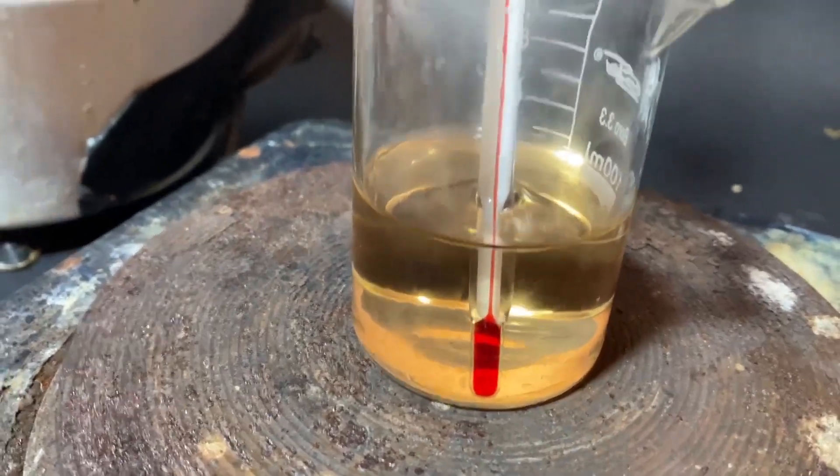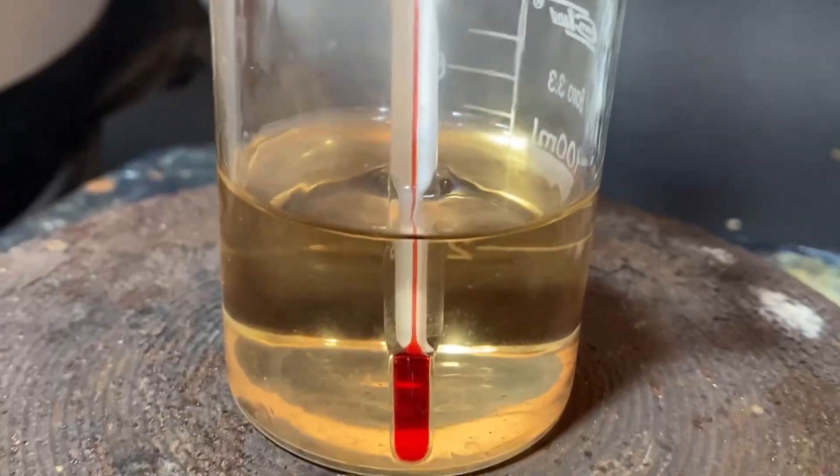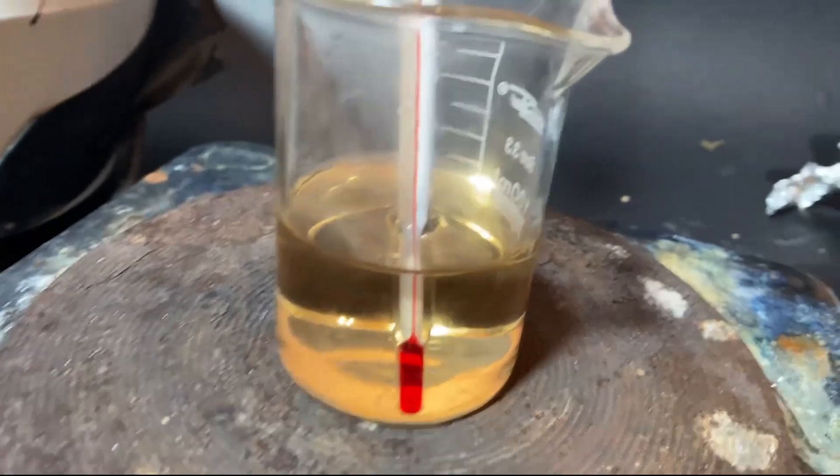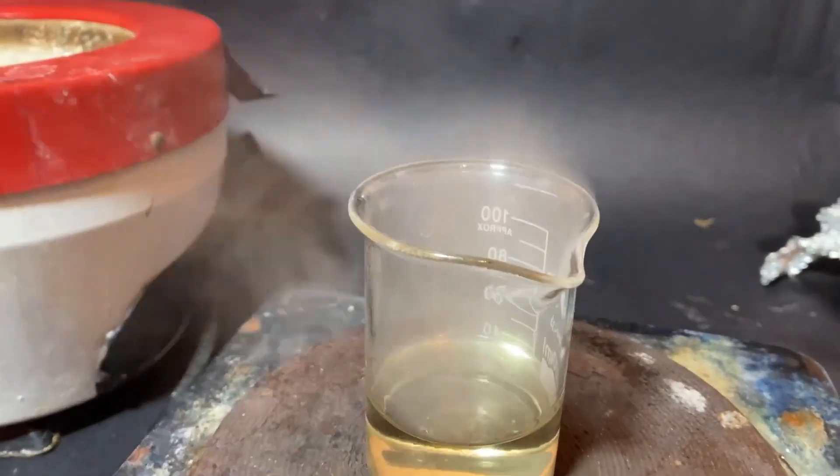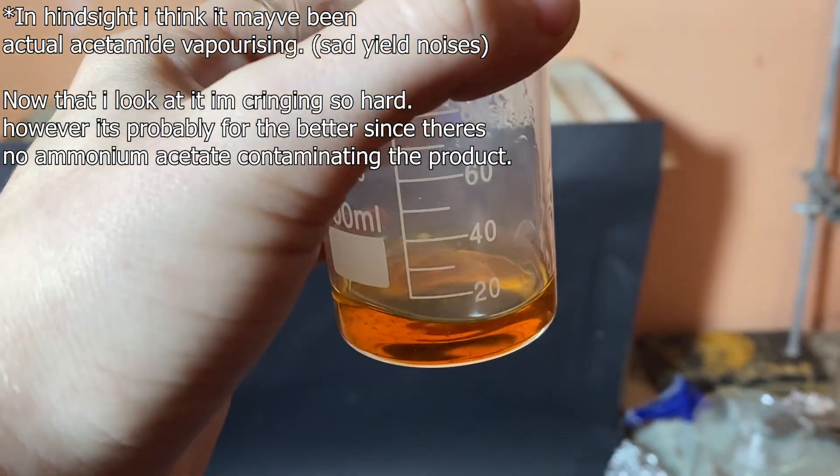As I was heating it on a hot plate, I started to detect a strong vinegar smell and my eyes became irritated, which probably means that I didn't distill everything off. Eventually a white dense cloud started coming from the beaker and it stopped smelling like vinegar. So I've let it cool down and placed it into a fridge.